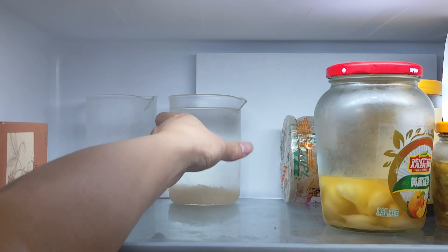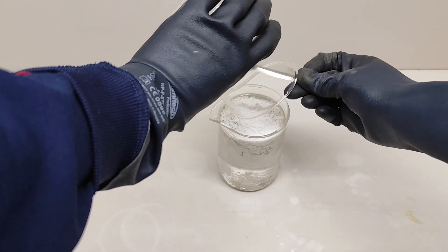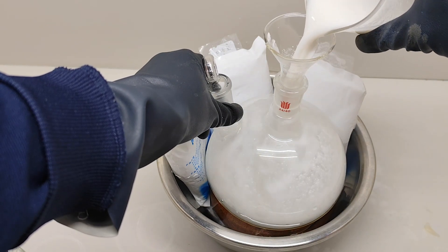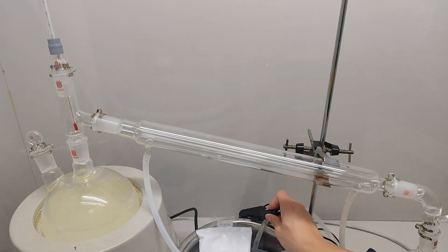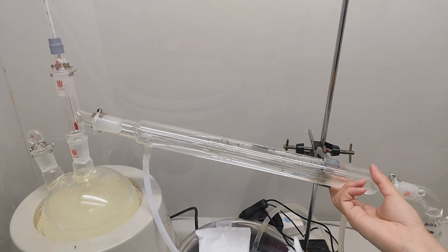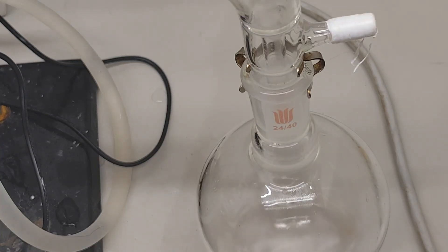The next day, I pour all the solution back into the flask, then pour all the calcium hypochlorite powder into the sodium carbonate solution and stir the mixture to make it react completely. When it's all ready, I pour the mixture into the flask and wait for the reaction to complete. About 6 hours later, I remove the ice bath and build a distillation setup to collect the fraction from 104°C to 108°C, and then perform a fractional distillation to obtain a concentrated UDMH solution.